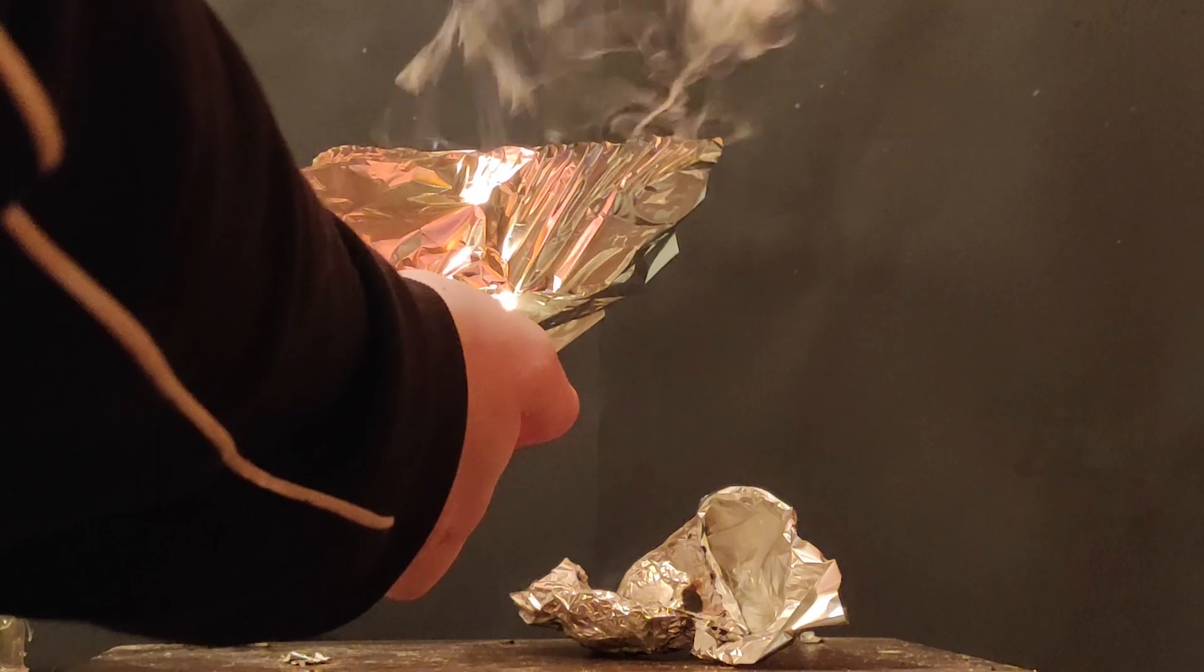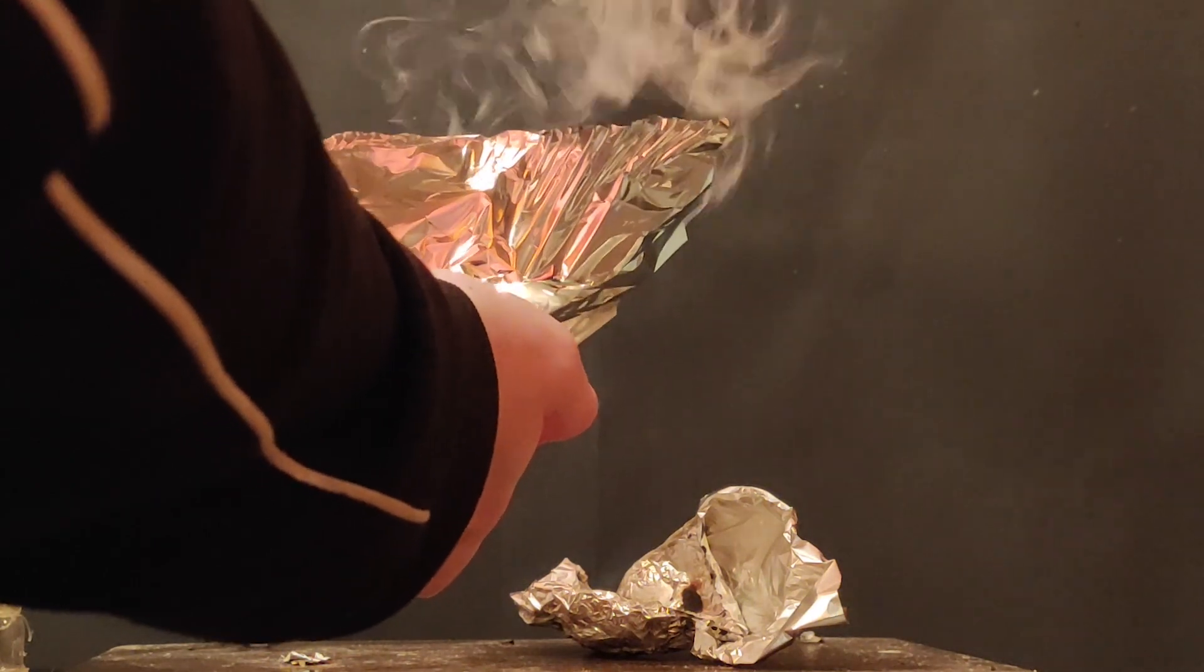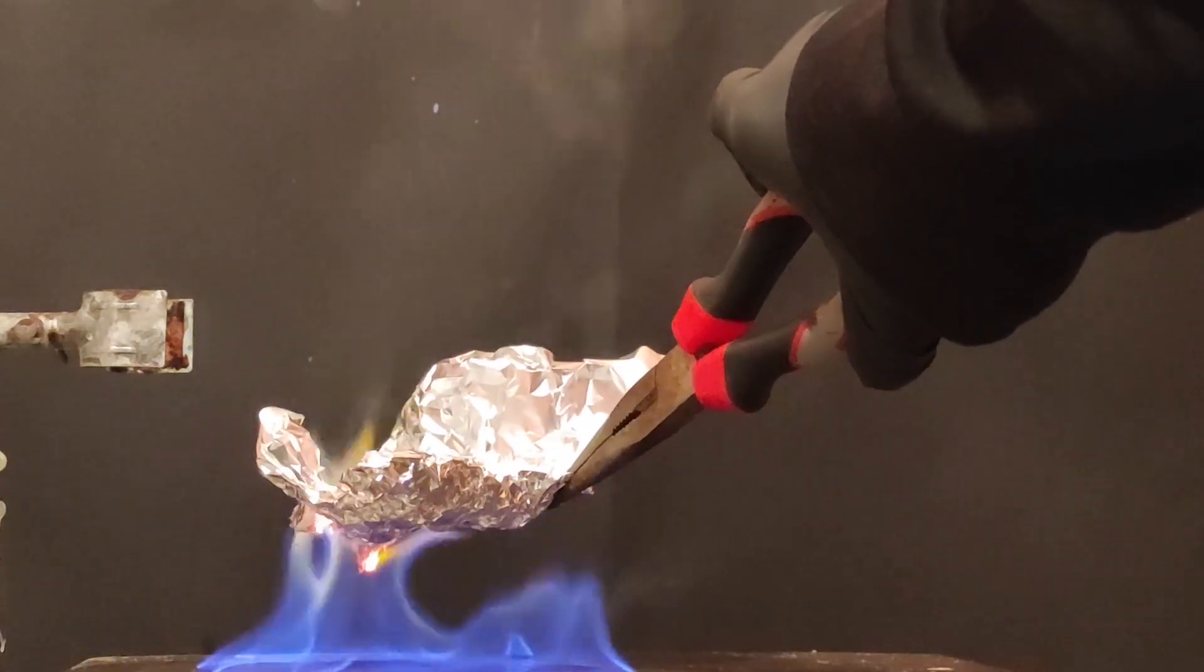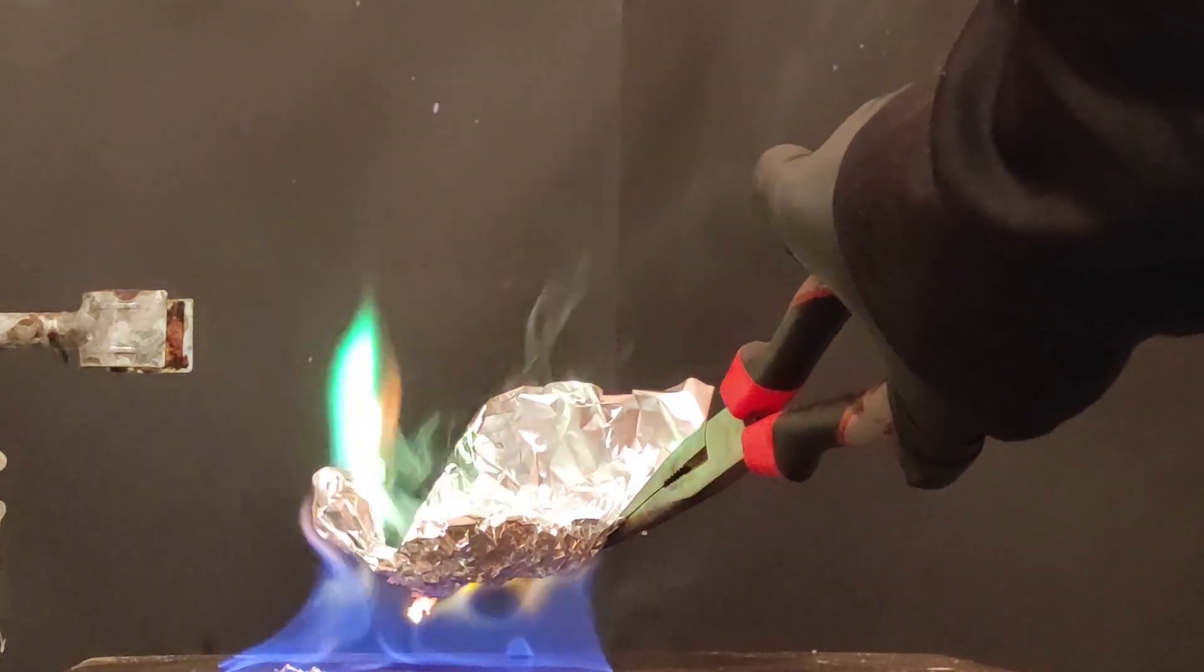To test it, I've decided to put some tetraamine on aluminum foil. When you heat the tetraamine it starts burning and then spews out some strange toxic gas. Which means that it can be confined, and when it's confined it will explode.